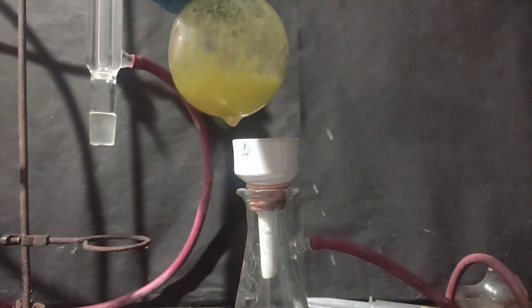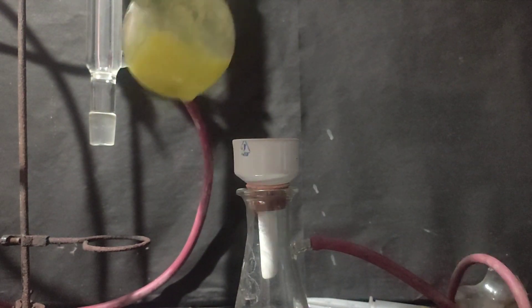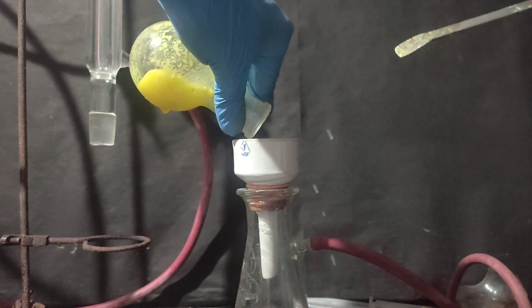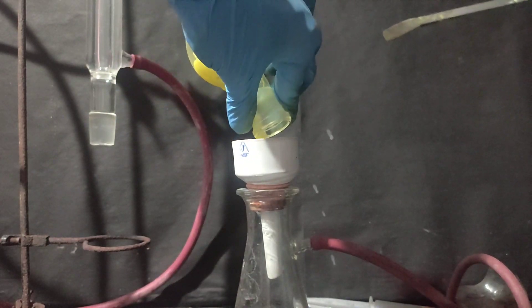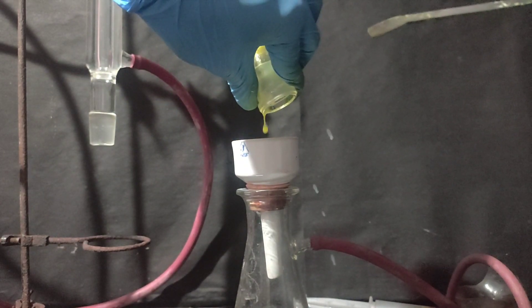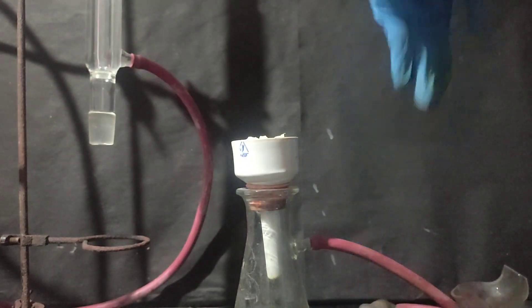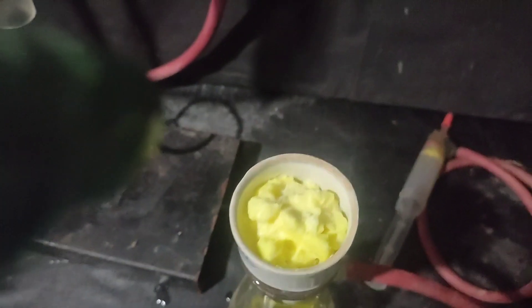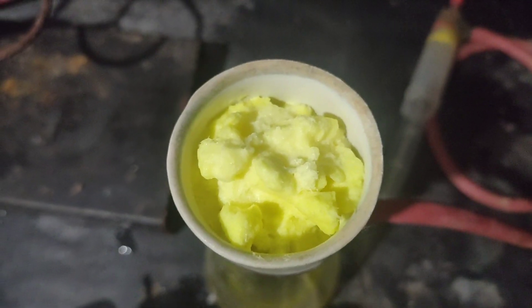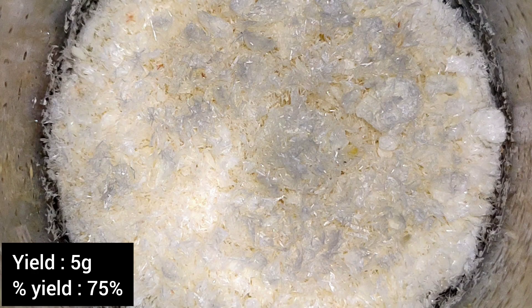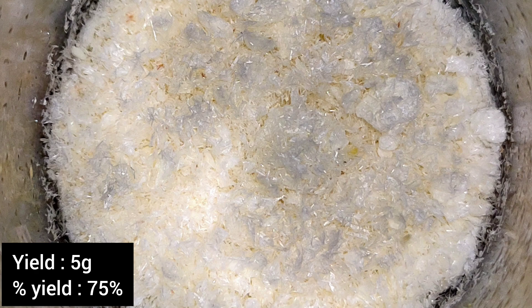Then, I filtered the crystals of meta-dinitrobenzene using vacuum filtration. This is the recrystallized meta-dinitrobenzene. After drying, the final yield came out to be 5 grams, which corresponds to a percentage yield of 75.75%.